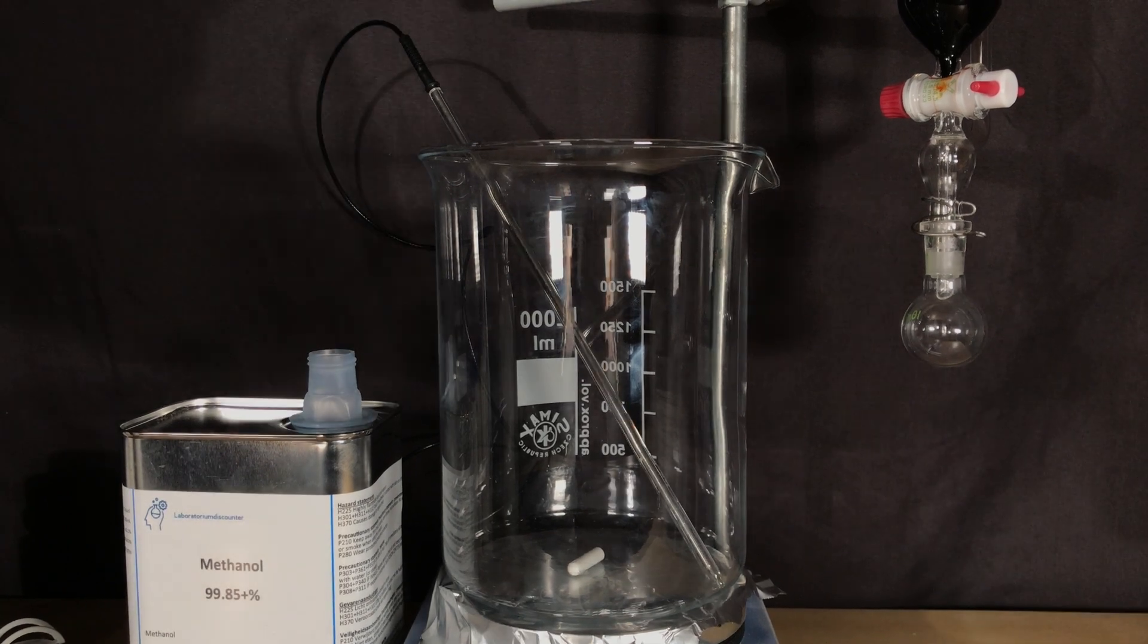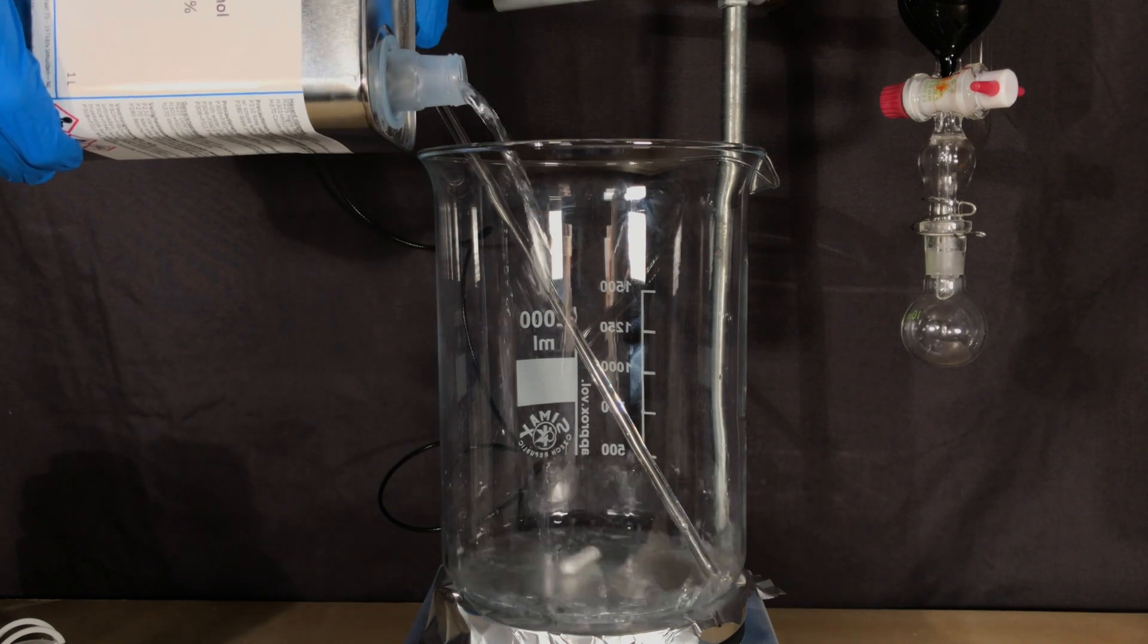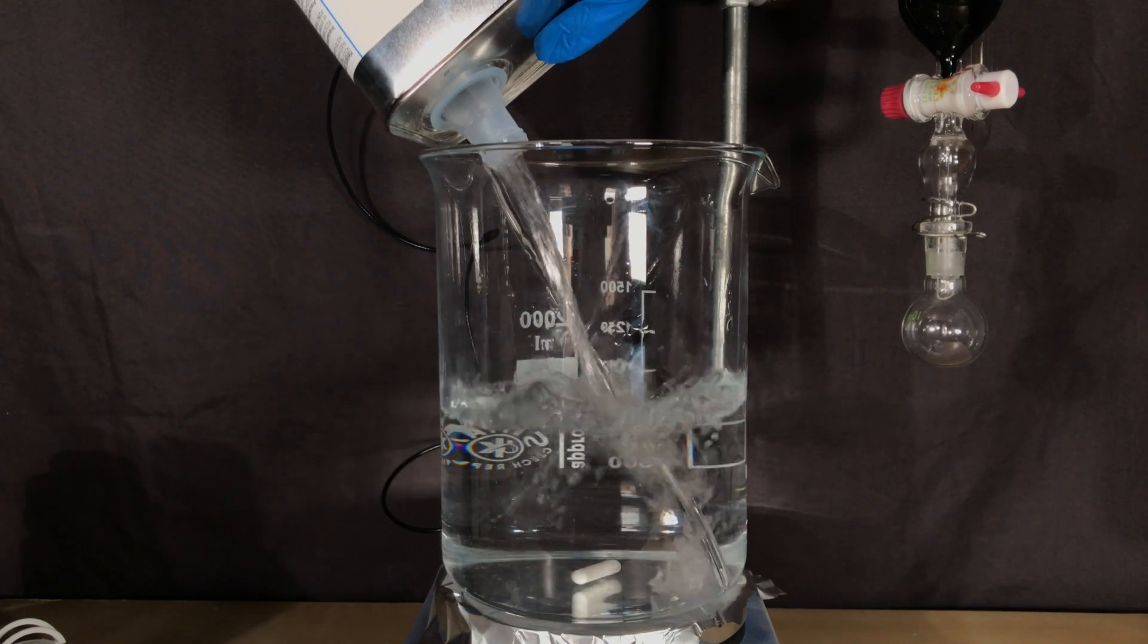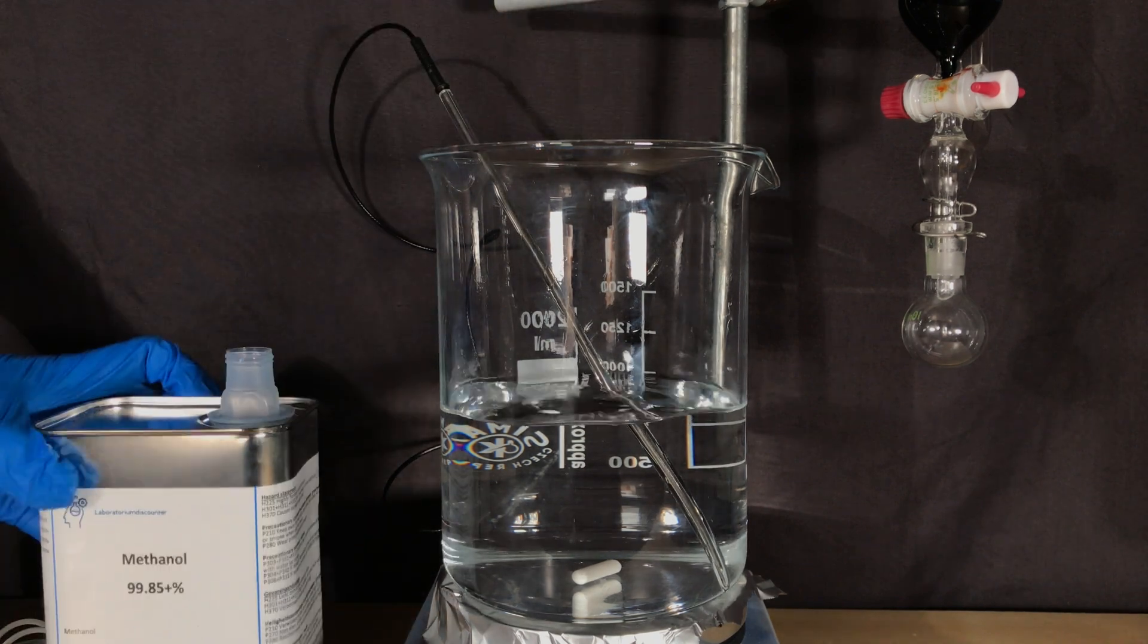As a solvent for today's reaction we are going to use methanol. It is going to dissolve the vanillin and methanol is also quite inert towards bromine. Methanol should be handled with great care because it's flammable and also quite toxic.